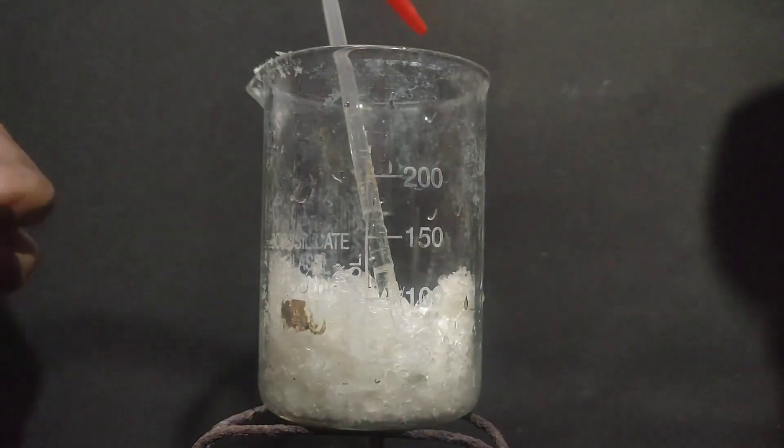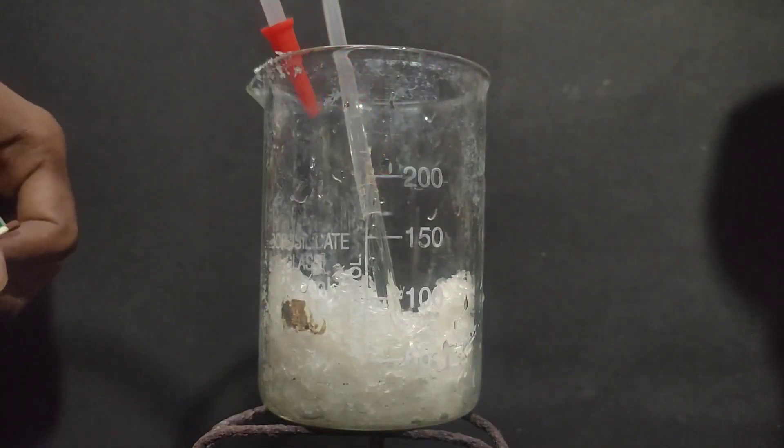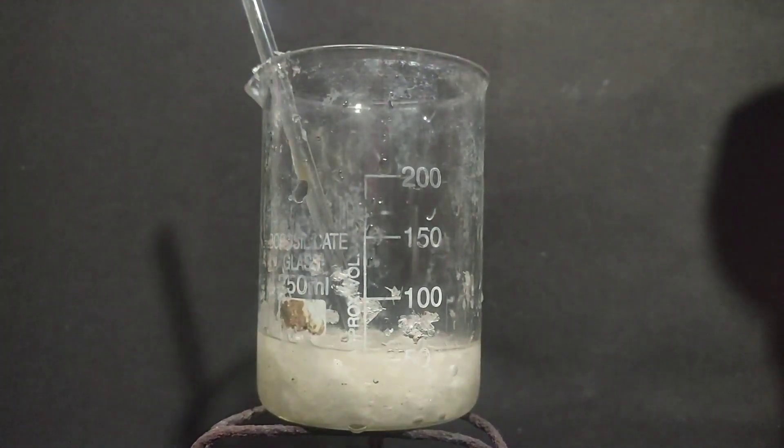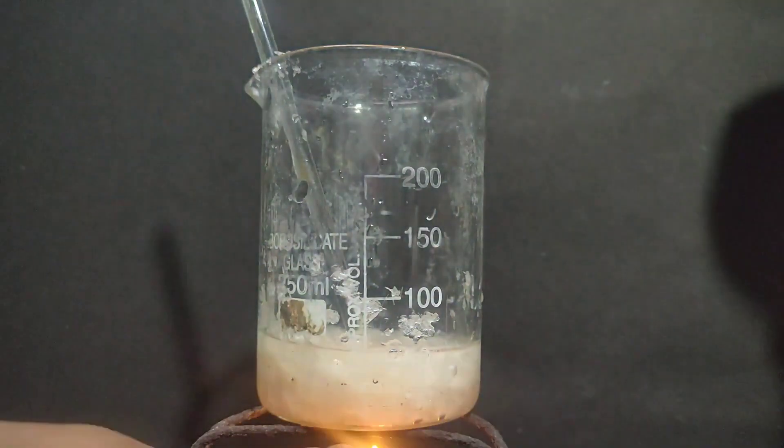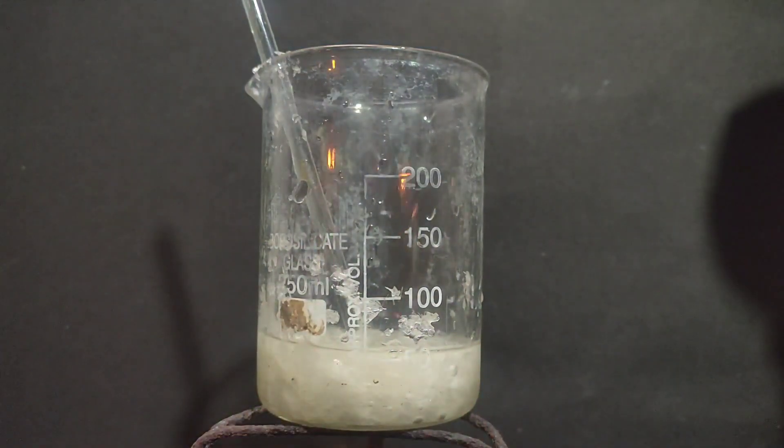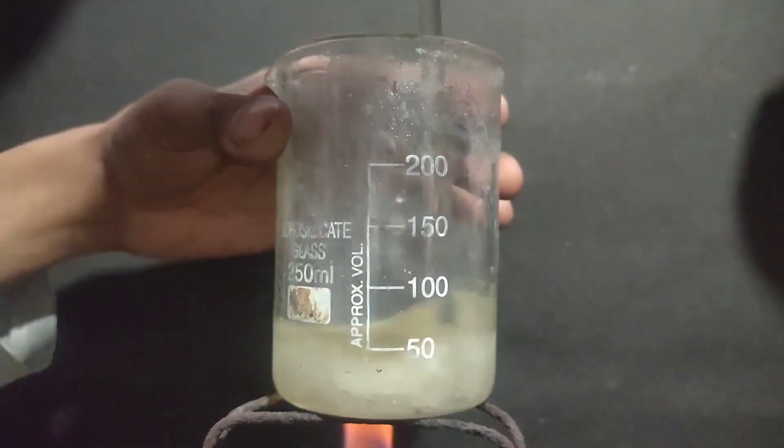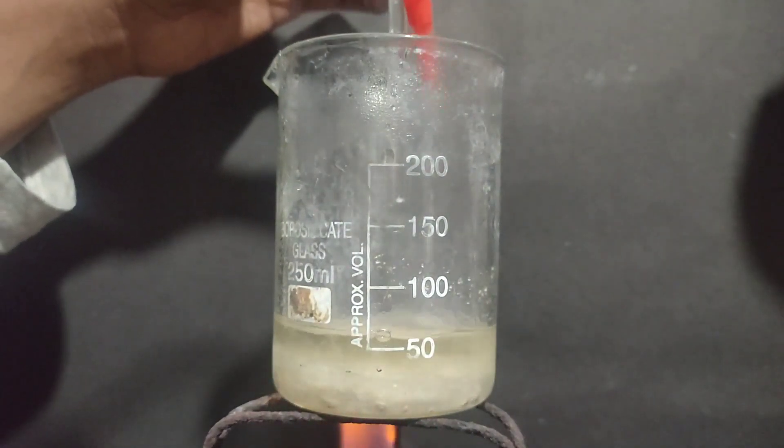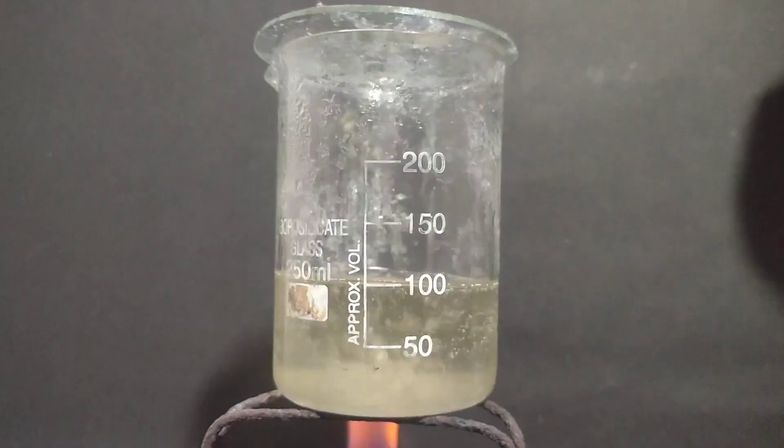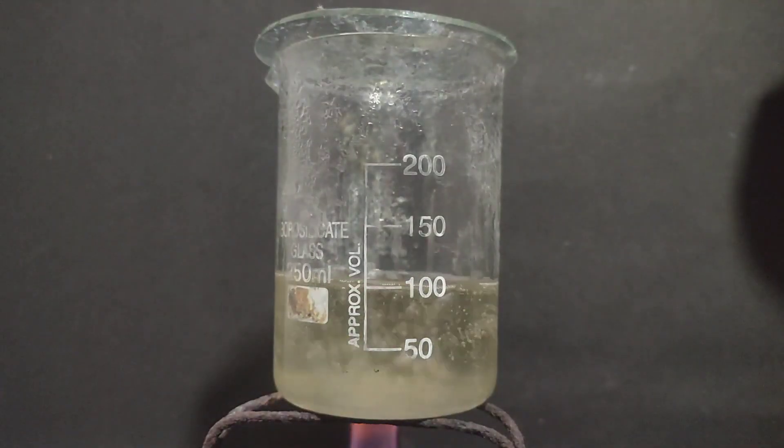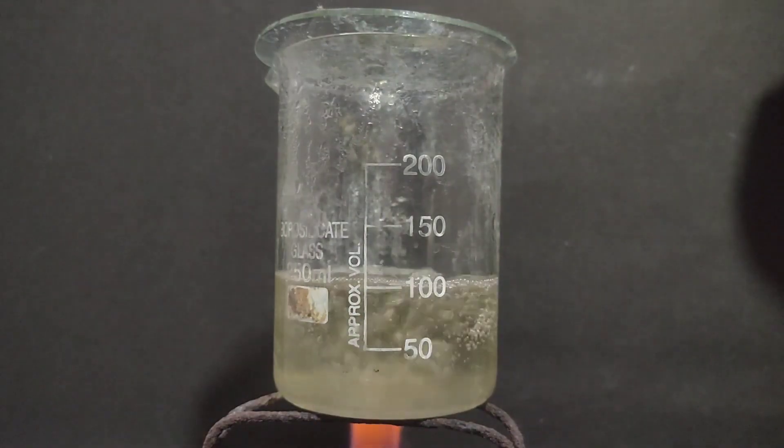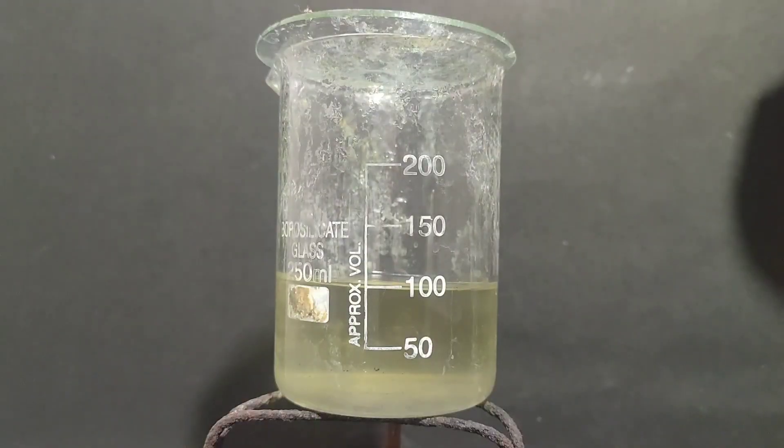Then I set the beaker on a tripod and added around 50 ml of distilled water initially, then started heating this. I kept adding distilled water until the precipitate completely dissolved. I added a total of 100 ml distilled water and now the crystals have completely dissolved. Now I let the solution cool.